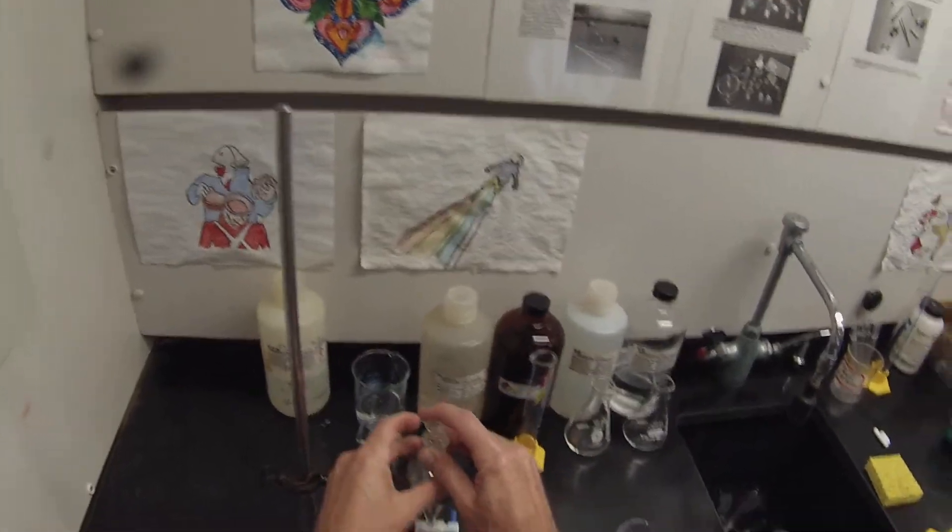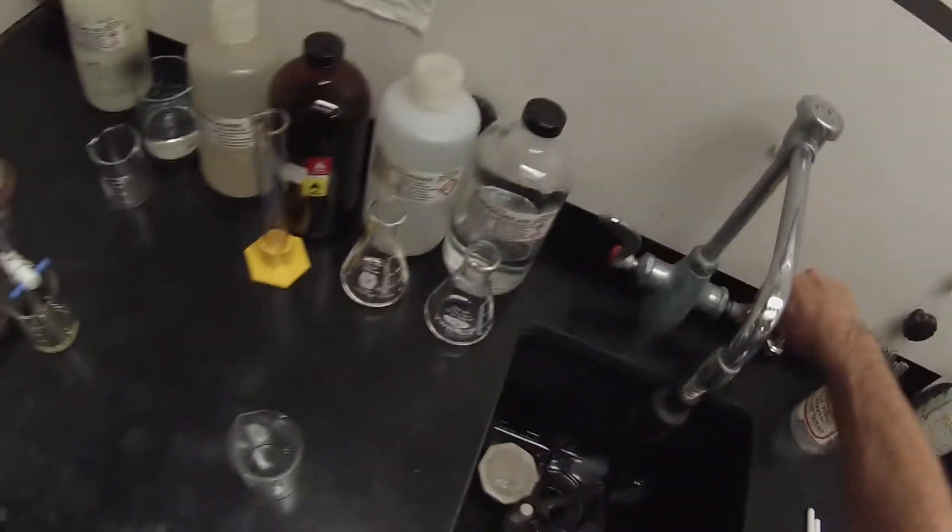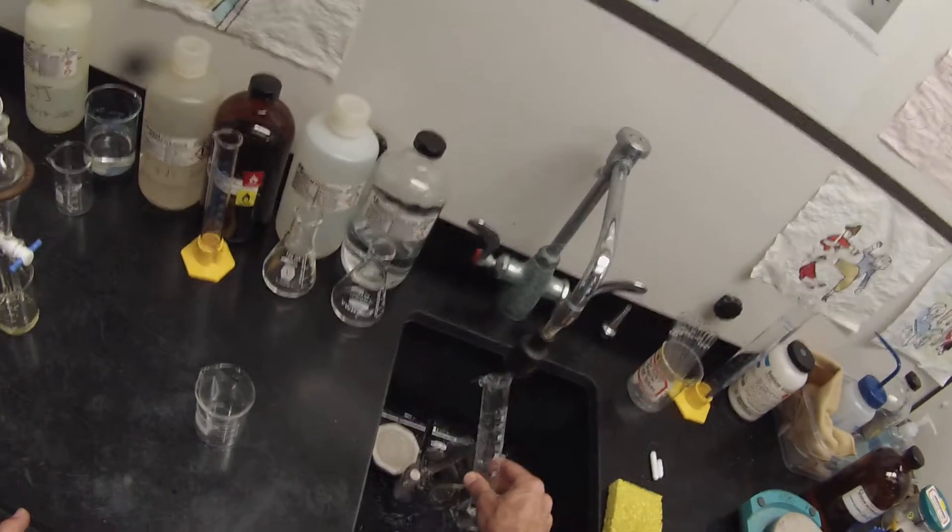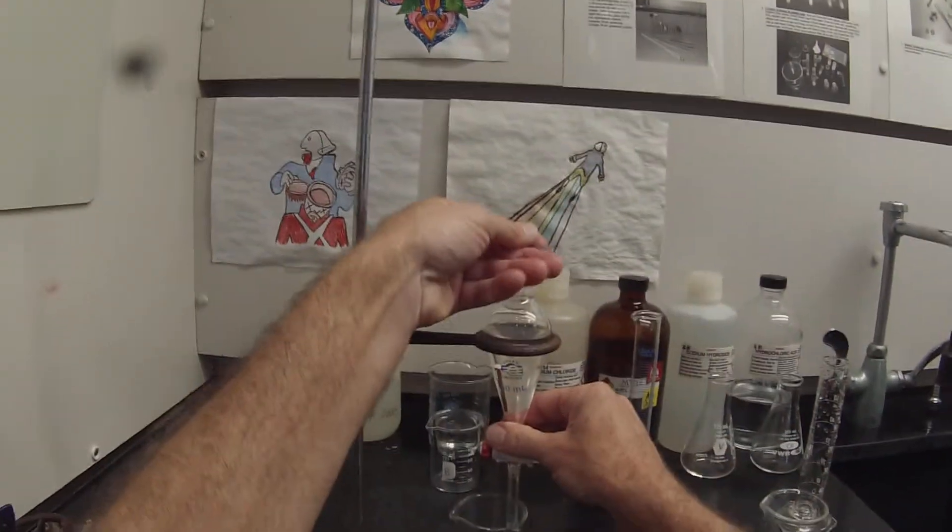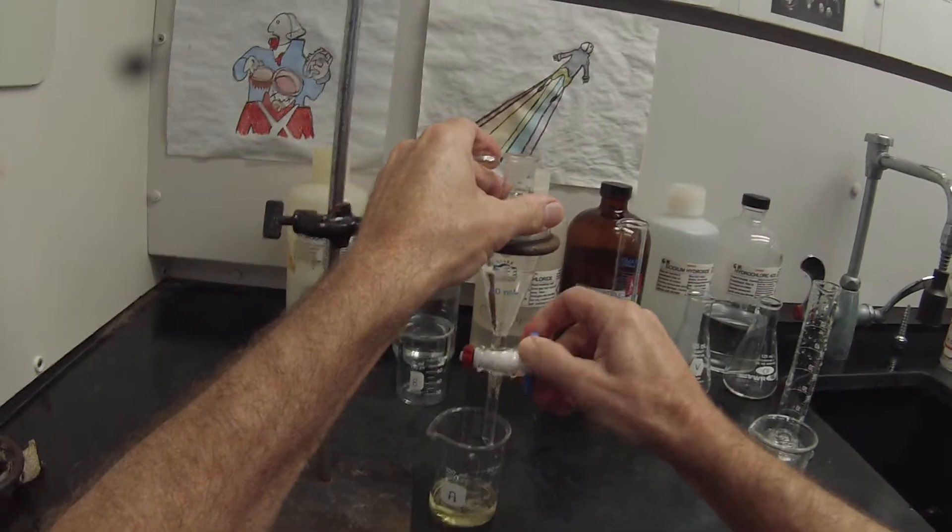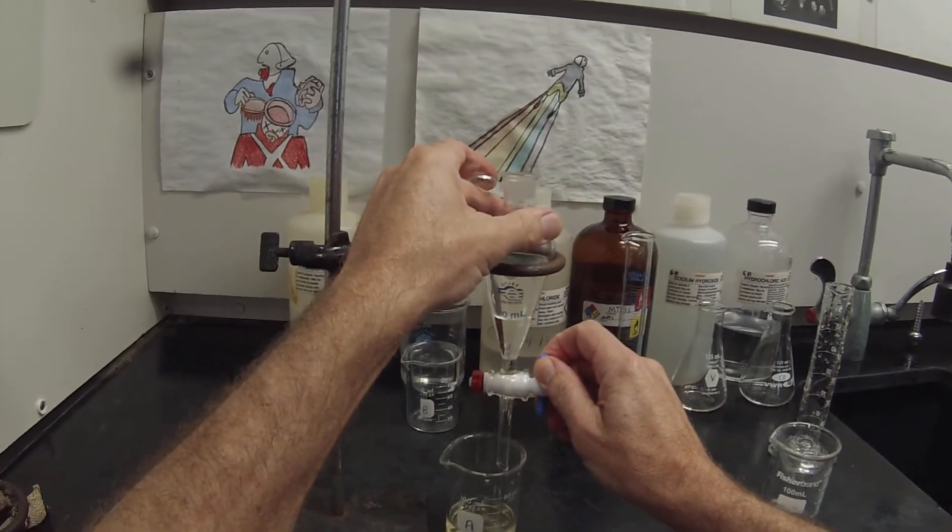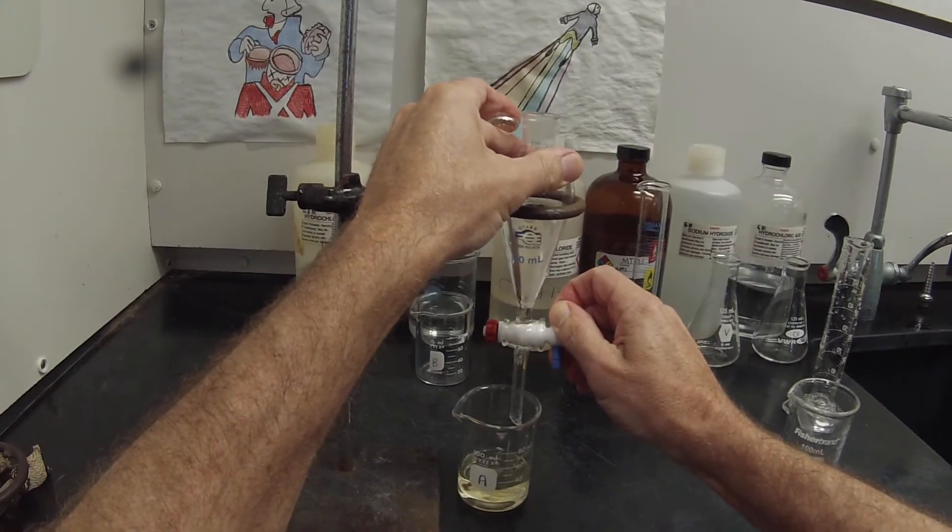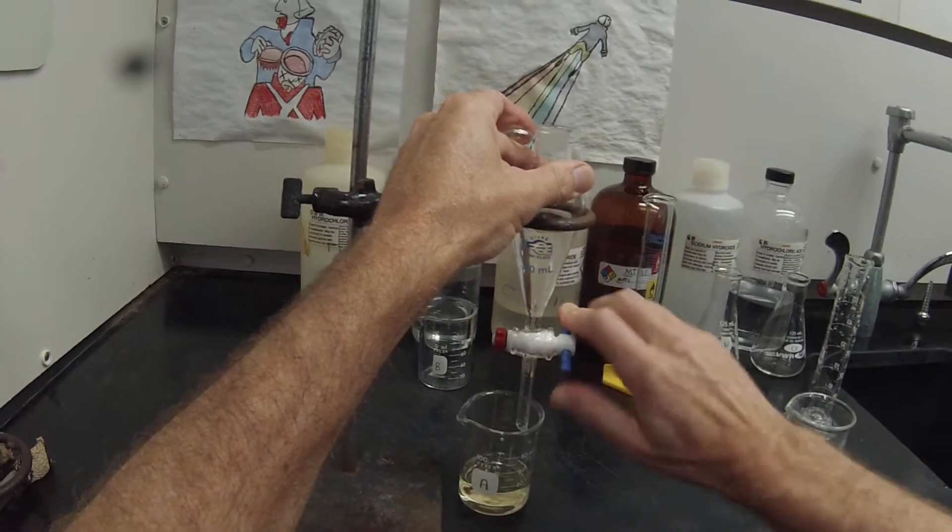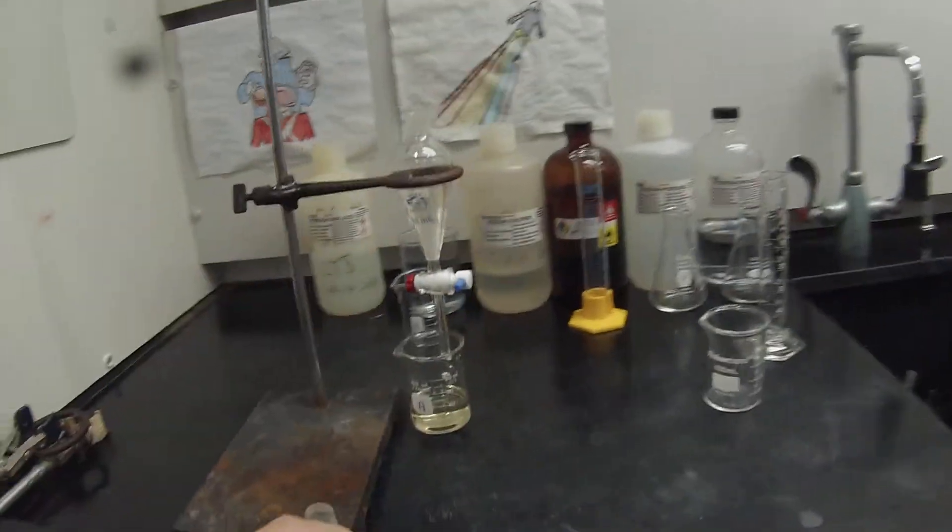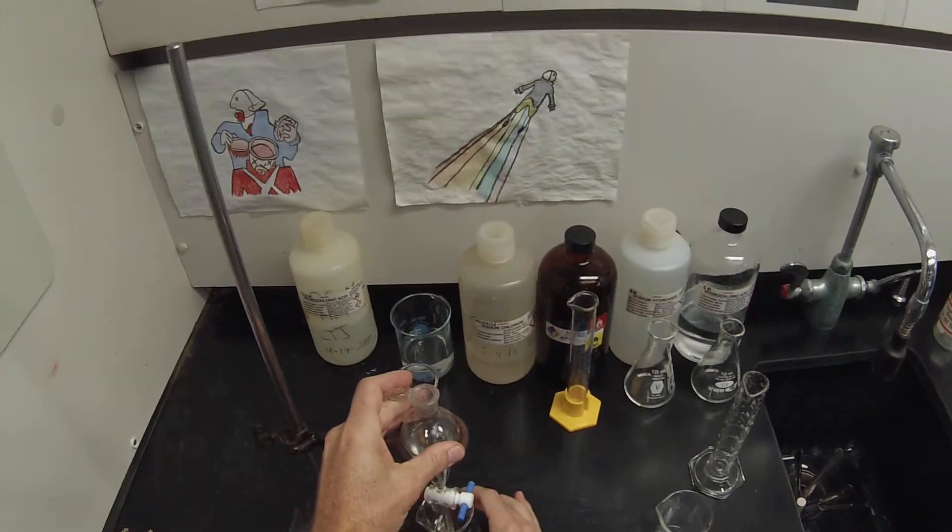Methyl tert-butyl ether is a nice extraction solvent, a nice alternative to ether because of its greater safety since it doesn't form explosive peroxides. It's very inexpensive because it has for years been used as a gasoline additive, so you can get large quantities of MTBE cheap. It's got a nice low density, so it floats on top just the way diethyl ether does. There's our acid layer, only about 30 milliliters of it this time.